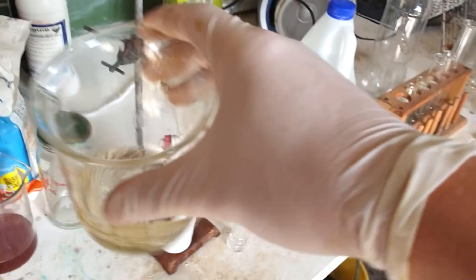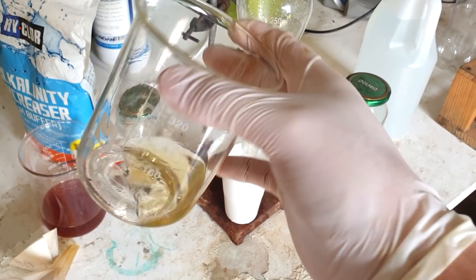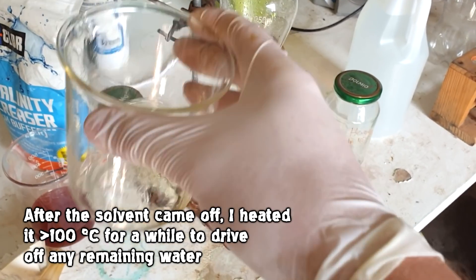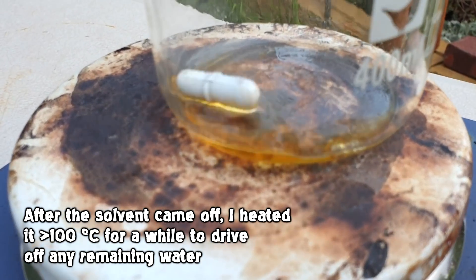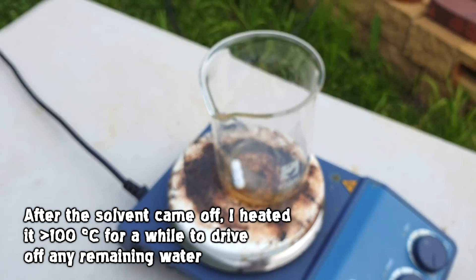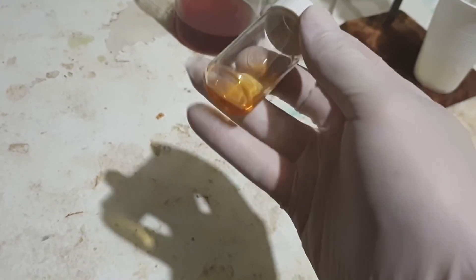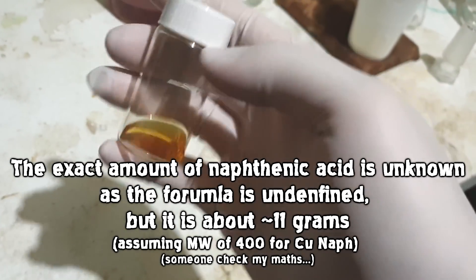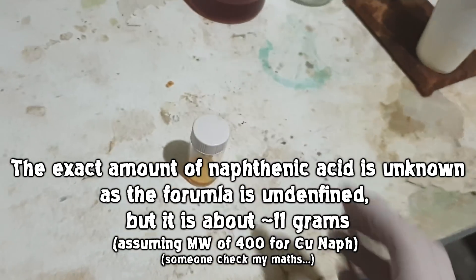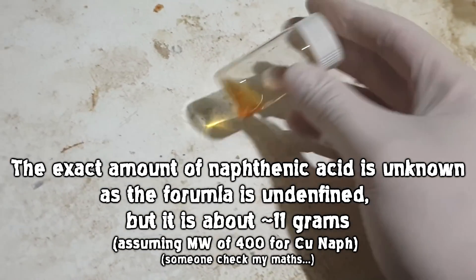Here's our final bright yellow extract. To get the solvent off, I'm just going to stir it very gently — it's about 35 degrees outside, which is above the boiling point of most of this solvent, so I don't really need to heat it. Here is 1.8 grams of yellow oil, which should be our final product. It shouldn't be yellow, but you know how it goes. This should be permethrin-free, and hopefully we haven't spread too much permethrin around.